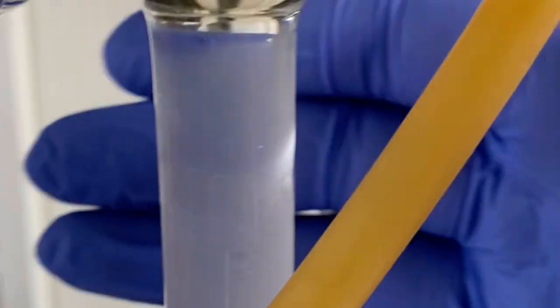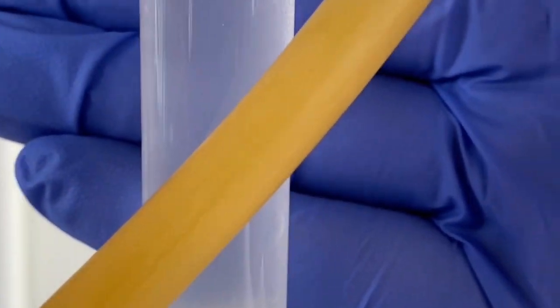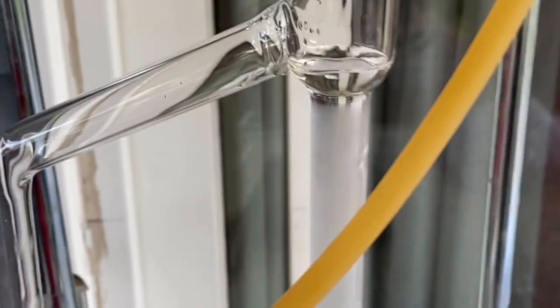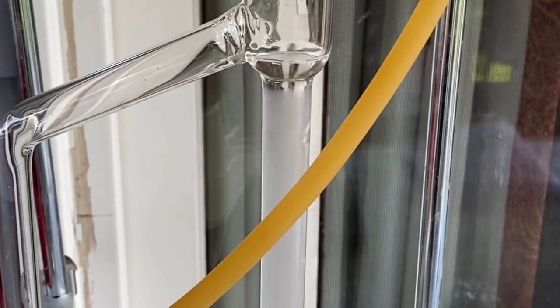Now let's see if we can get a shot of a water droplet rolling downwards. I want to see if we can get that. I don't think we're going to be able to get it, which kind of sucks. But if you go to the Doug's Lab video, you'll see it there. Kind of annoying that you can't see it on this, but my phone's quality is kind of trash, so what are you gonna do, you know?